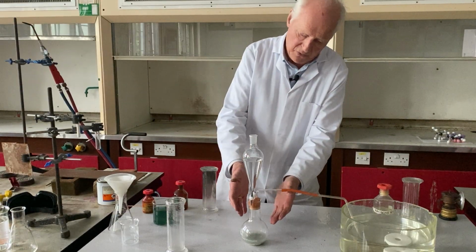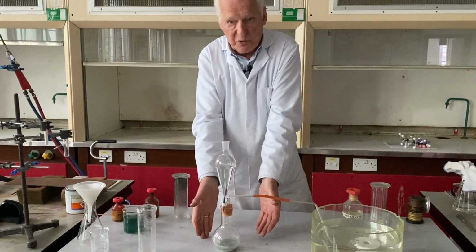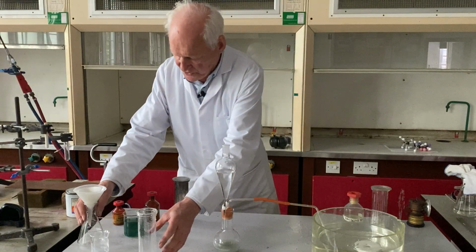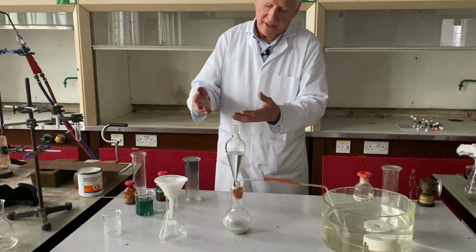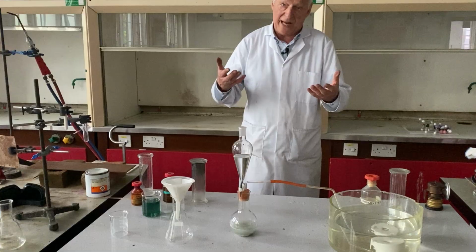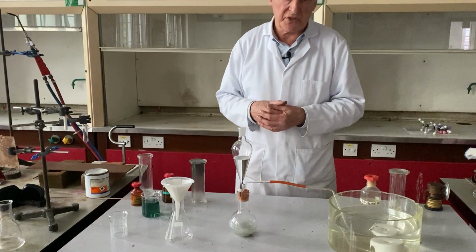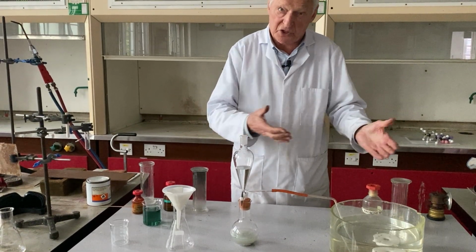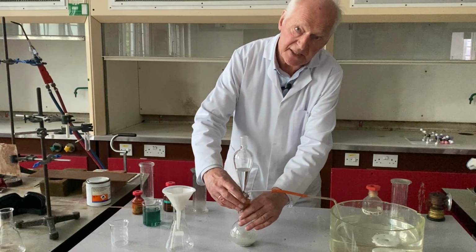At the moment, the reason why I'm doing this is because it does make sense to look to see what's left behind. We must always examine all the products of every chemical reaction. So what I have prepared here is some filter paper in a funnel, and I'm going to now take the solution which I have made from the reaction of calcium carbide with water. Any reasonable person with reasonable knowledge of chemistry should allow us to deduce what the products are. So acetylene was one product, and the other product we'll investigate first of all.